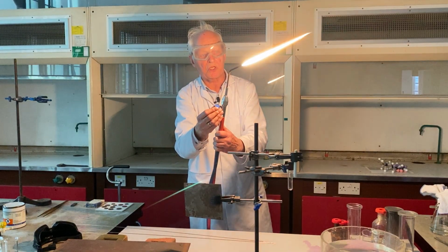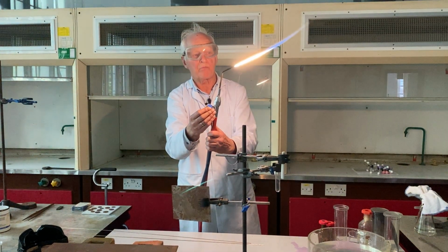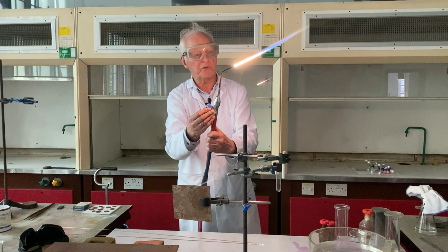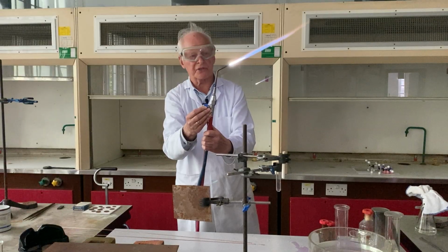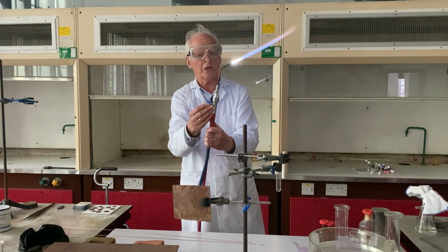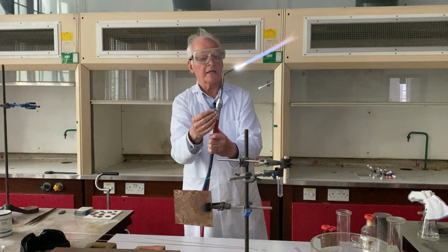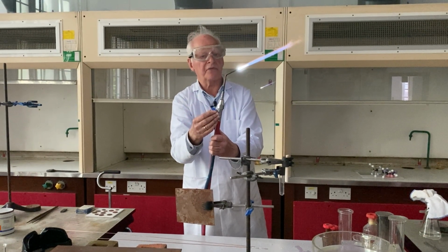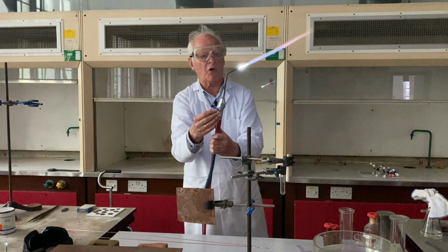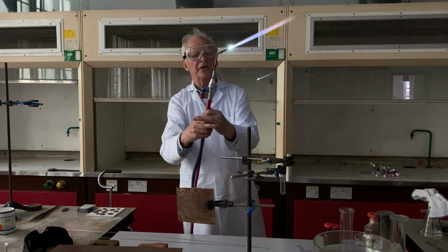But as we continue to increase oxygen, the luminous turns to a blue color. And for those of you who are familiar with Bunsen burners, we now have a miniature Bunsen burner flame with a cone of unburnt acetylene right in the middle there, and that's the bright blue, and the cone of burnt acetylene obviously around. So this is like a Bunsen burner in miniature.